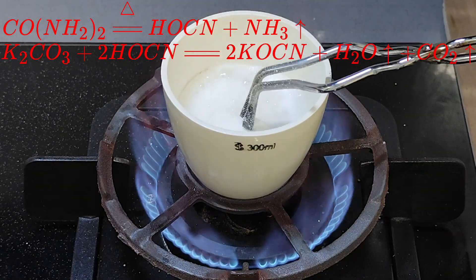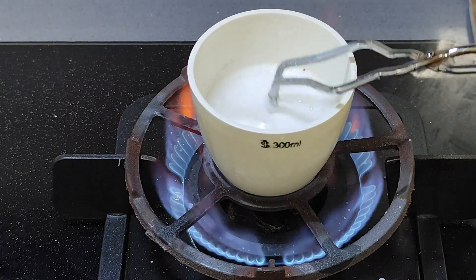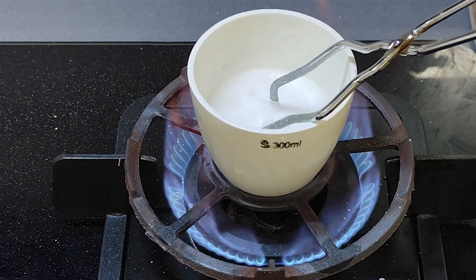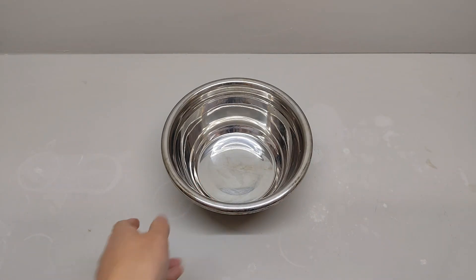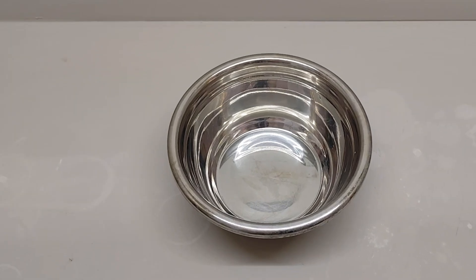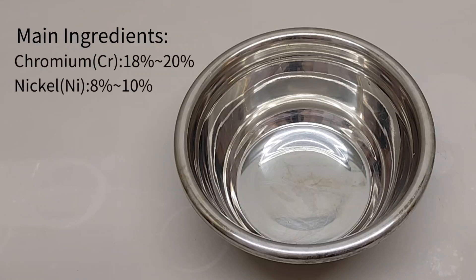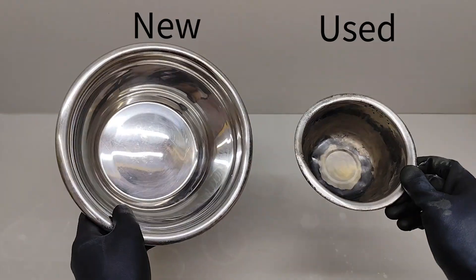When the reaction is going on, I have to mention something vital. First, a glass beaker is not recommended as a container when heating up the mixture, because it would be easily cracked. Second, a normal stainless steel container is not recommended either, because one of the main ingredients of the alloy, chromium, would react with the melted alkali and make your product dirty, and also destroy your container.